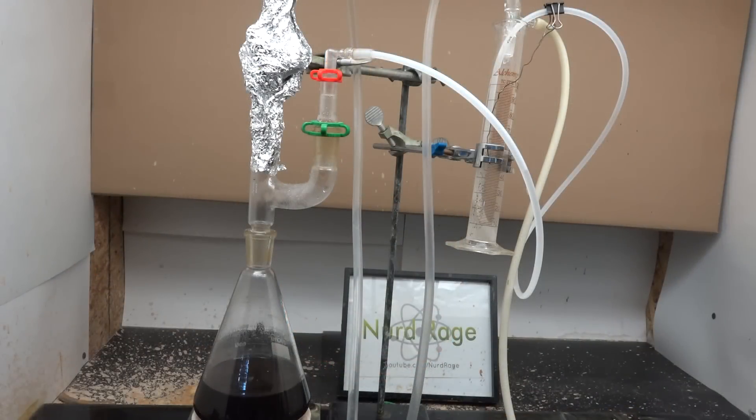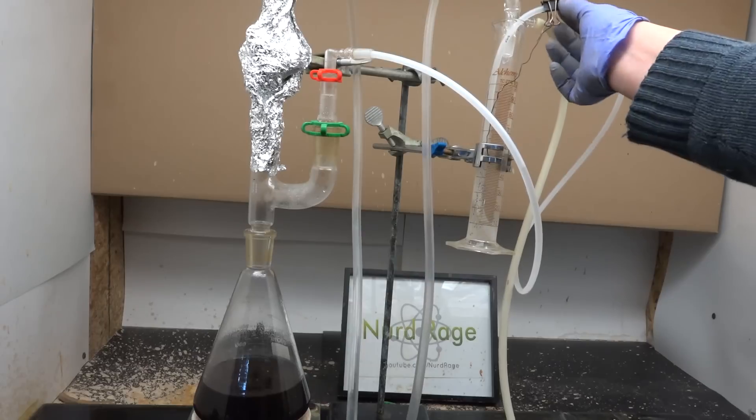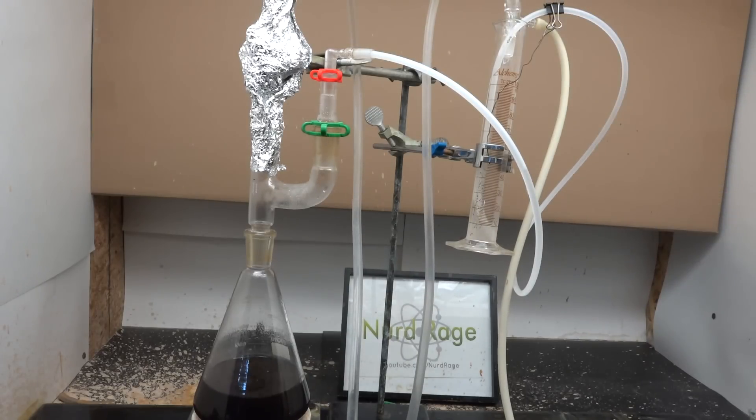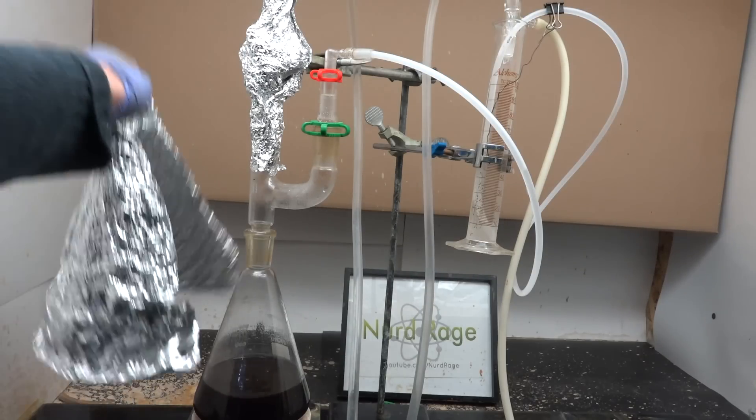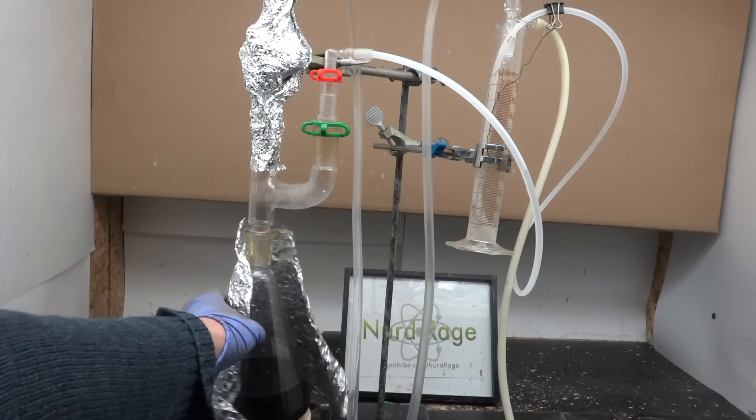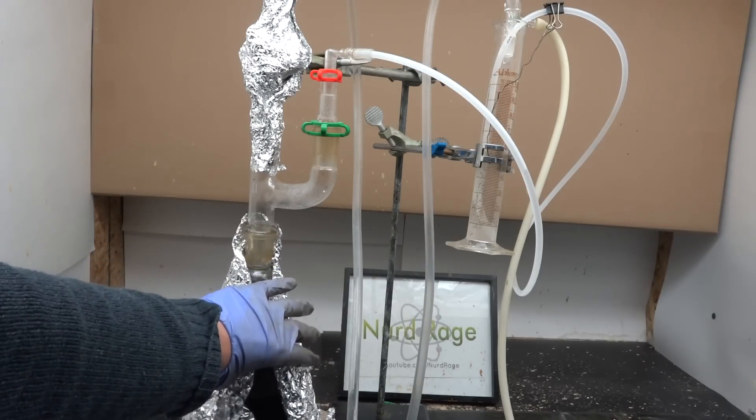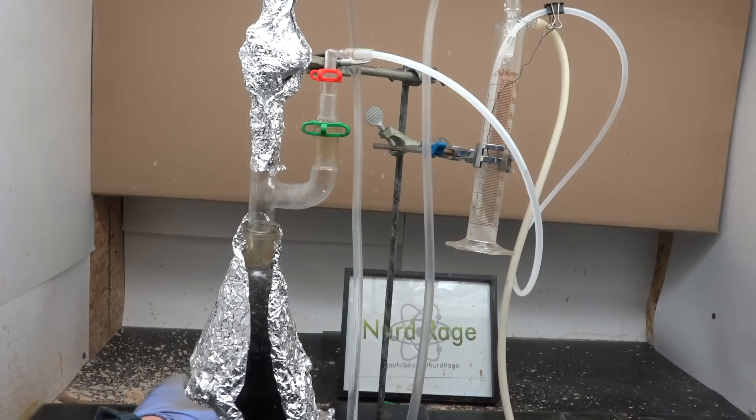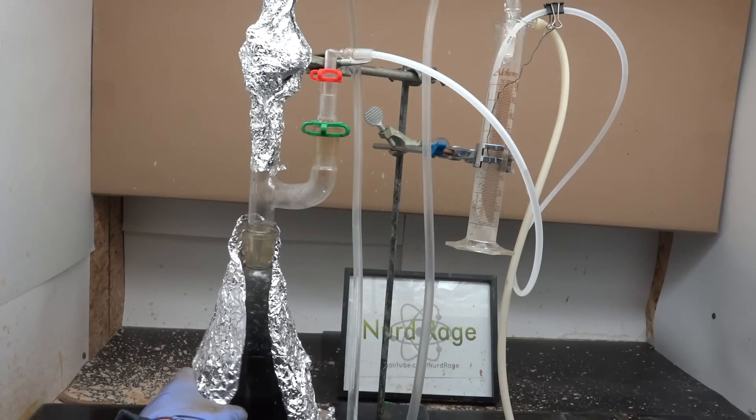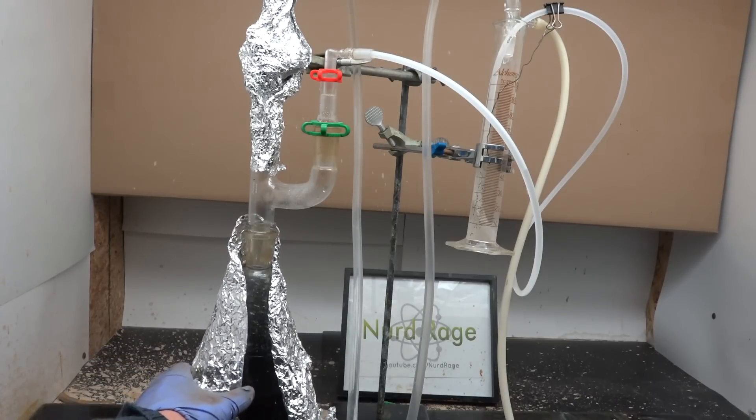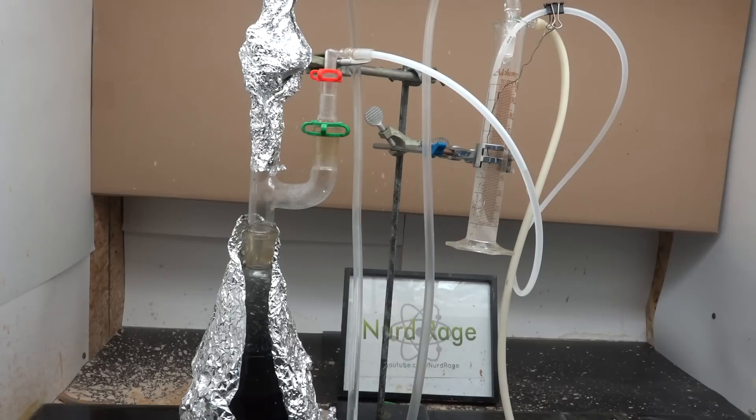Now set up a Dean-Stark apparatus around the flask operating in heavy return mode. I have shown how to make these in a previous video. A traditional apparatus cannot be used because it only returns the lighter fraction but we want to return the heavy fraction. Now chlorotoluene boils at around 160 celsius. To minimize heat loss and make this reaction go faster I'm insulating the hot portions of the Dean-Stark apparatus with foil. Normally I'd insulate more of this but I'm leaving some parts open so you can see the progress of the reaction.